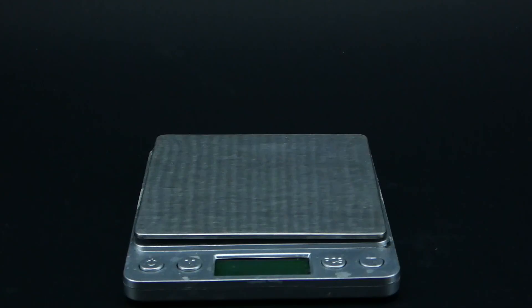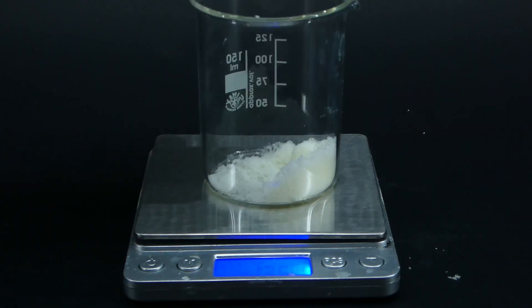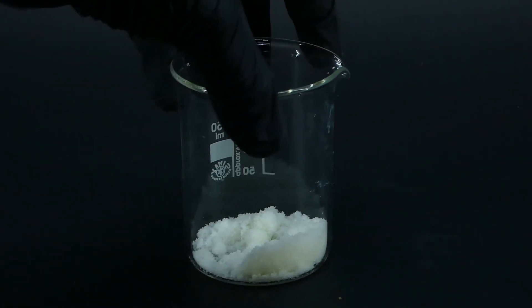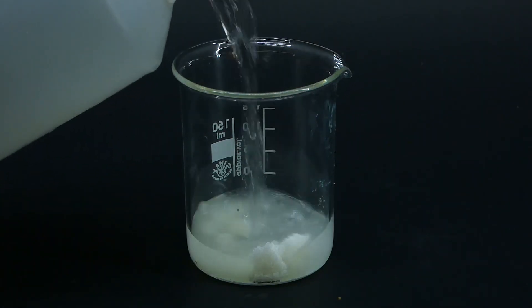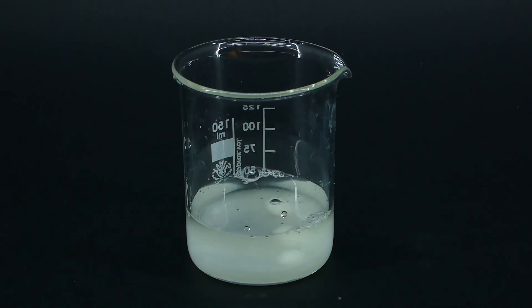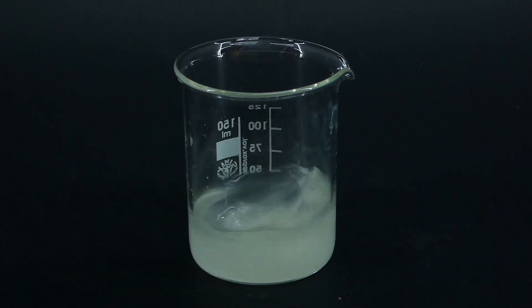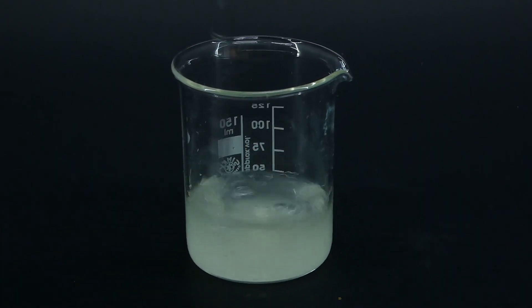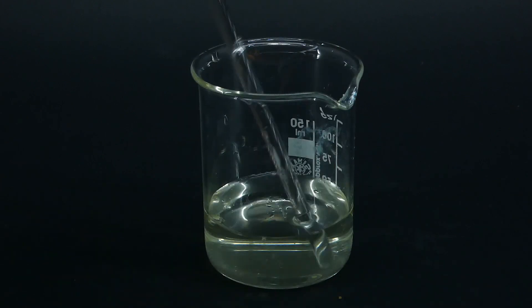The last thing that I need to make the isopropyl nitrite is a sodium nitrite solution. To make it, I dissolved 13.8g of sodium nitrite in about 50ml of distilled water. Sodium nitrite dissolves very easily in water, and it also cools the water down, because its dissolution is endothermic.